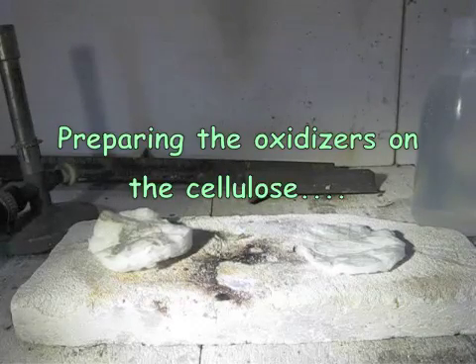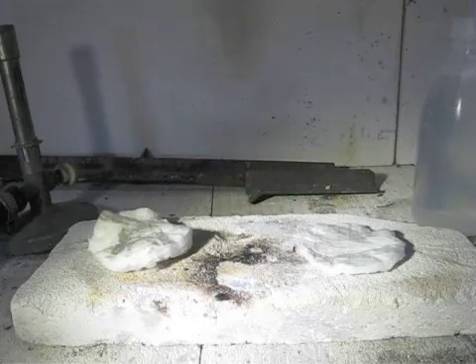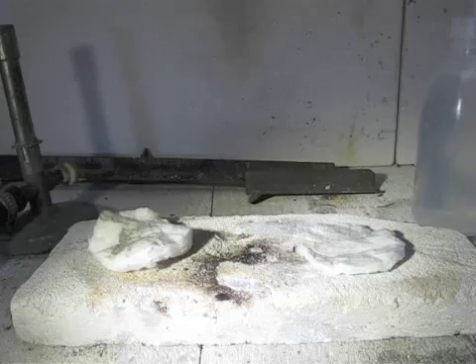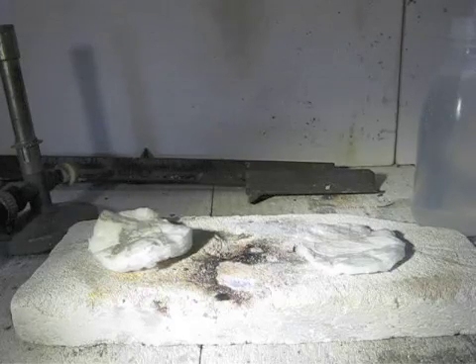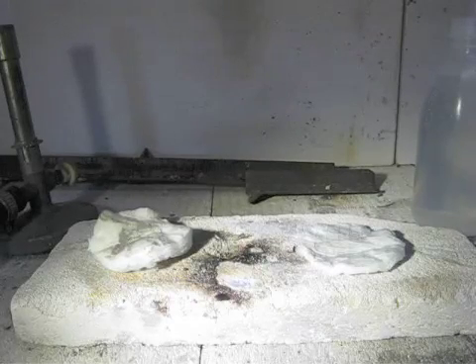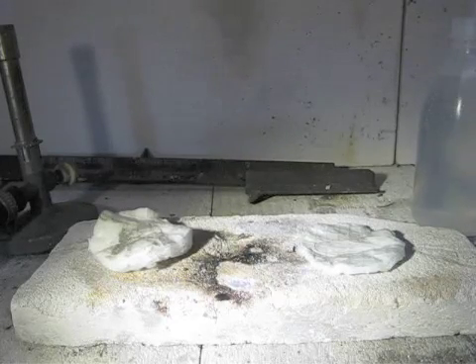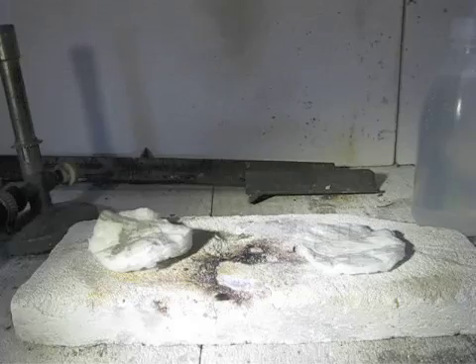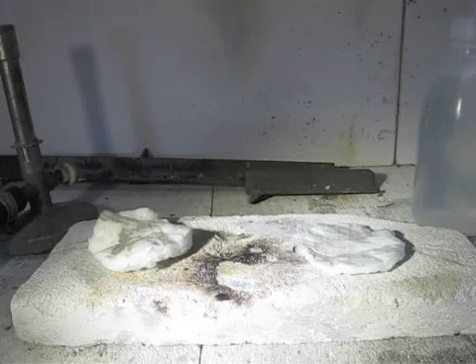Ok, let's start this video. I'm going to show you the difference with cellulose — how it reacts with potassium chlorate and potassium nitrate.